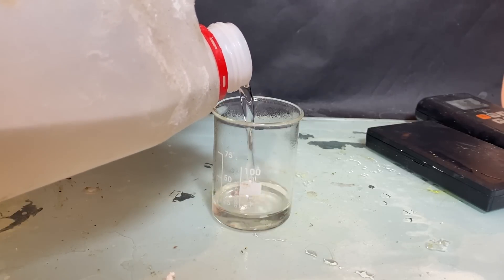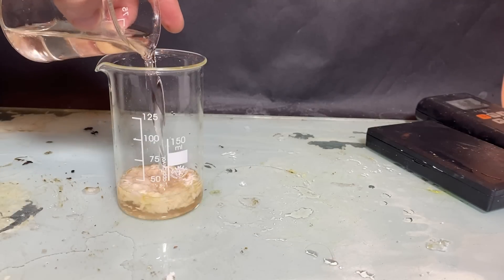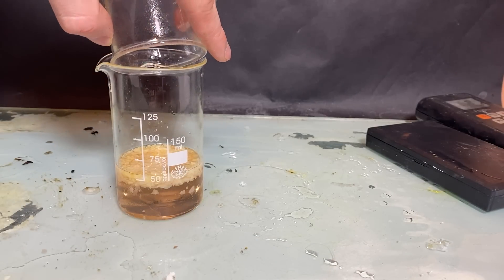Anyway, now that I have finally acquired the chloroform, I have proceeded to procrastinate on this project due to some school BS. However, eventually I've gotten some additional free time and I've decided to try my hand at making the cancer juice.